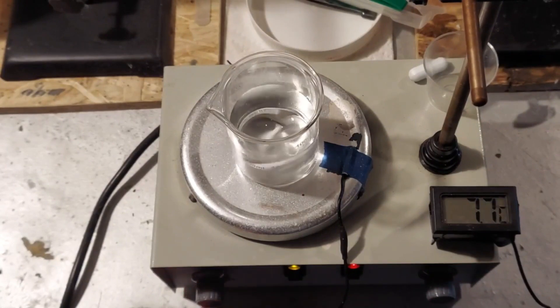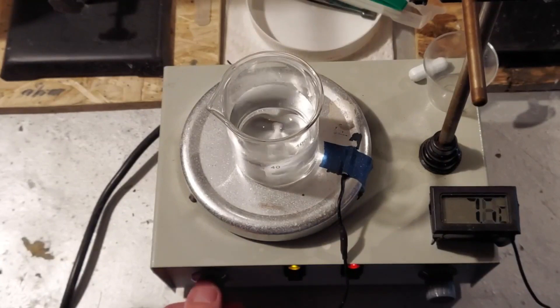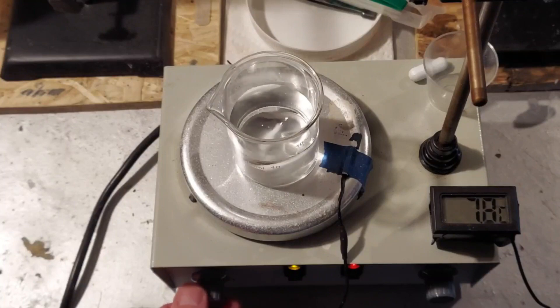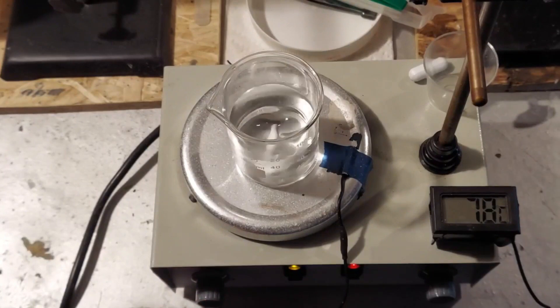You can see it's 7.7 degrees Celsius right here. It's kind of cold out here in my little lab, but we want to get that up there close to 80, 85, 90 when we add the potassium bisulfate.